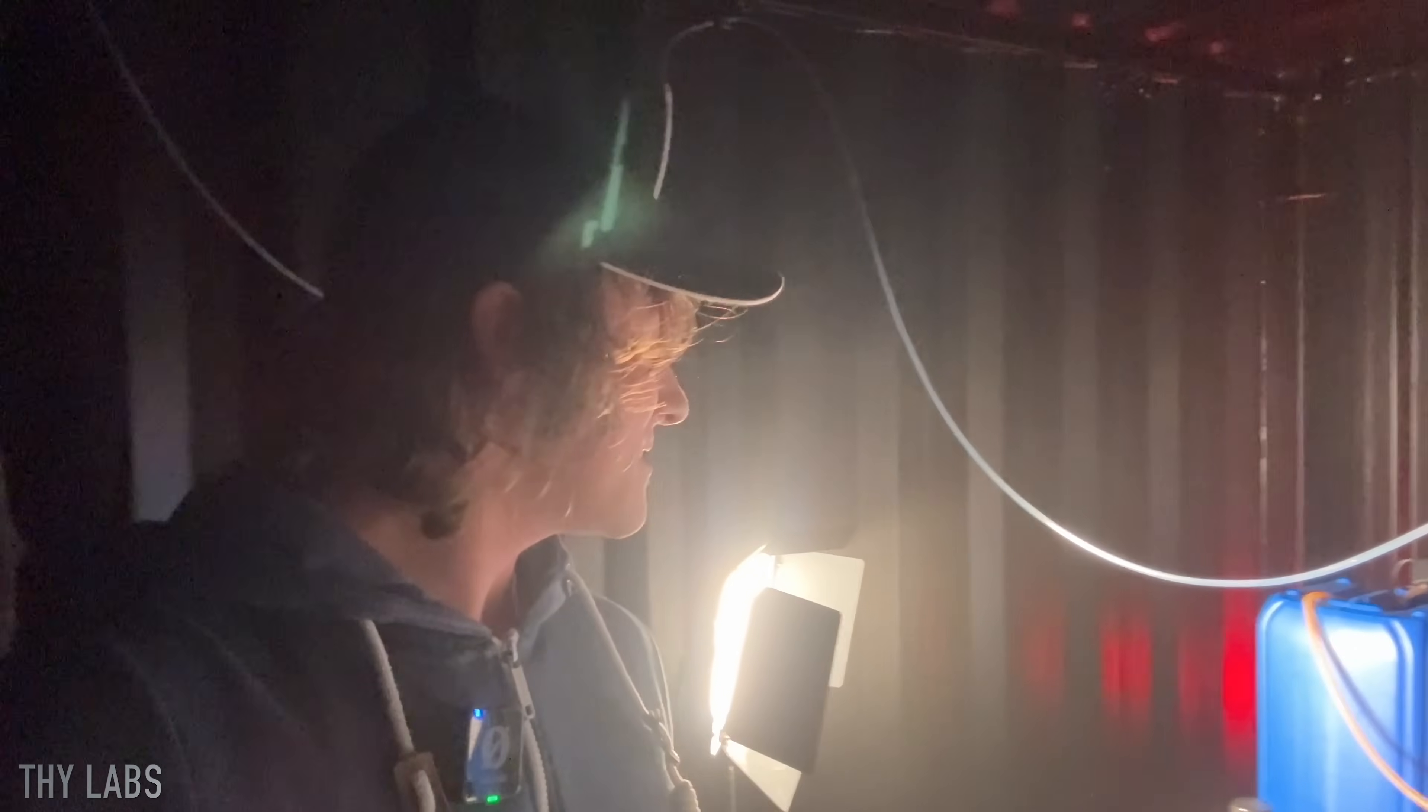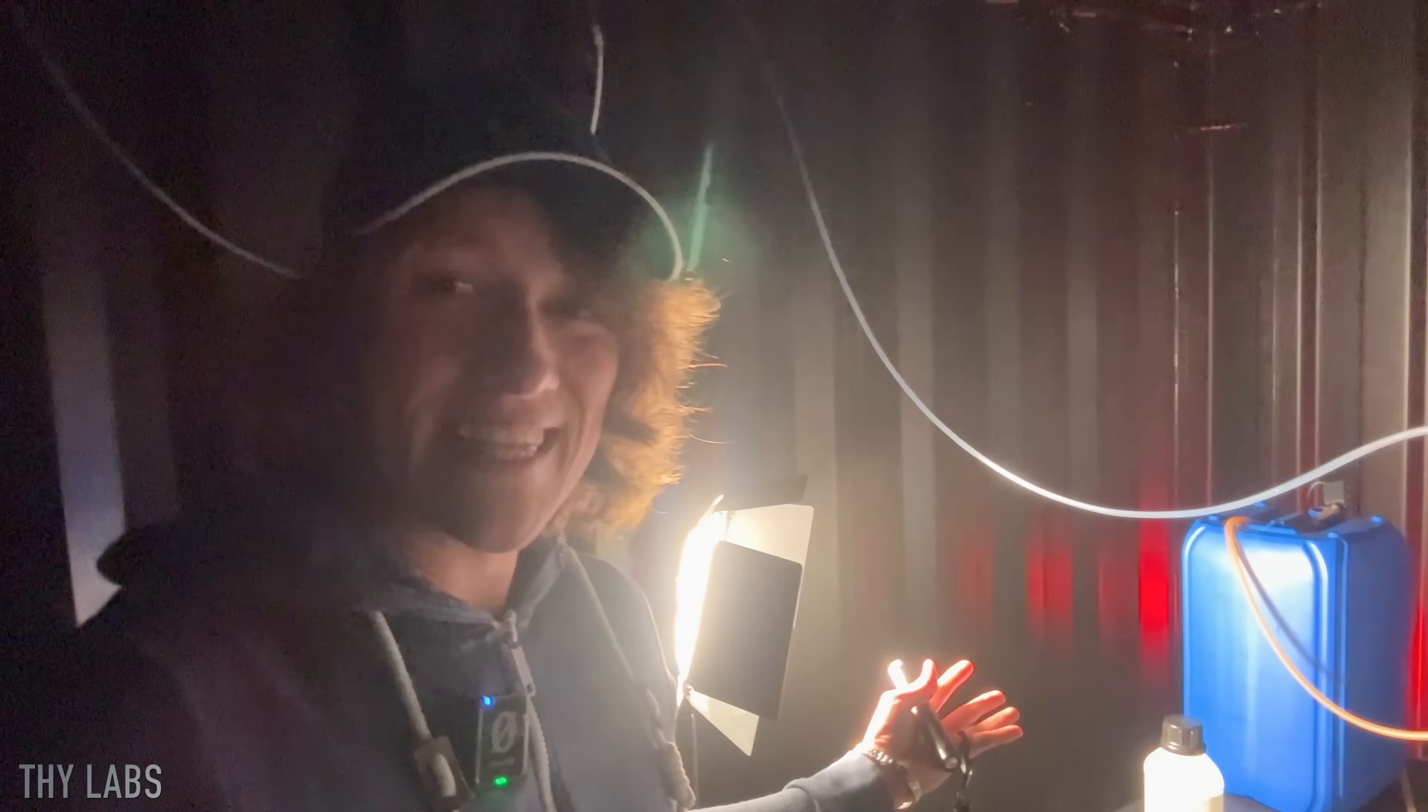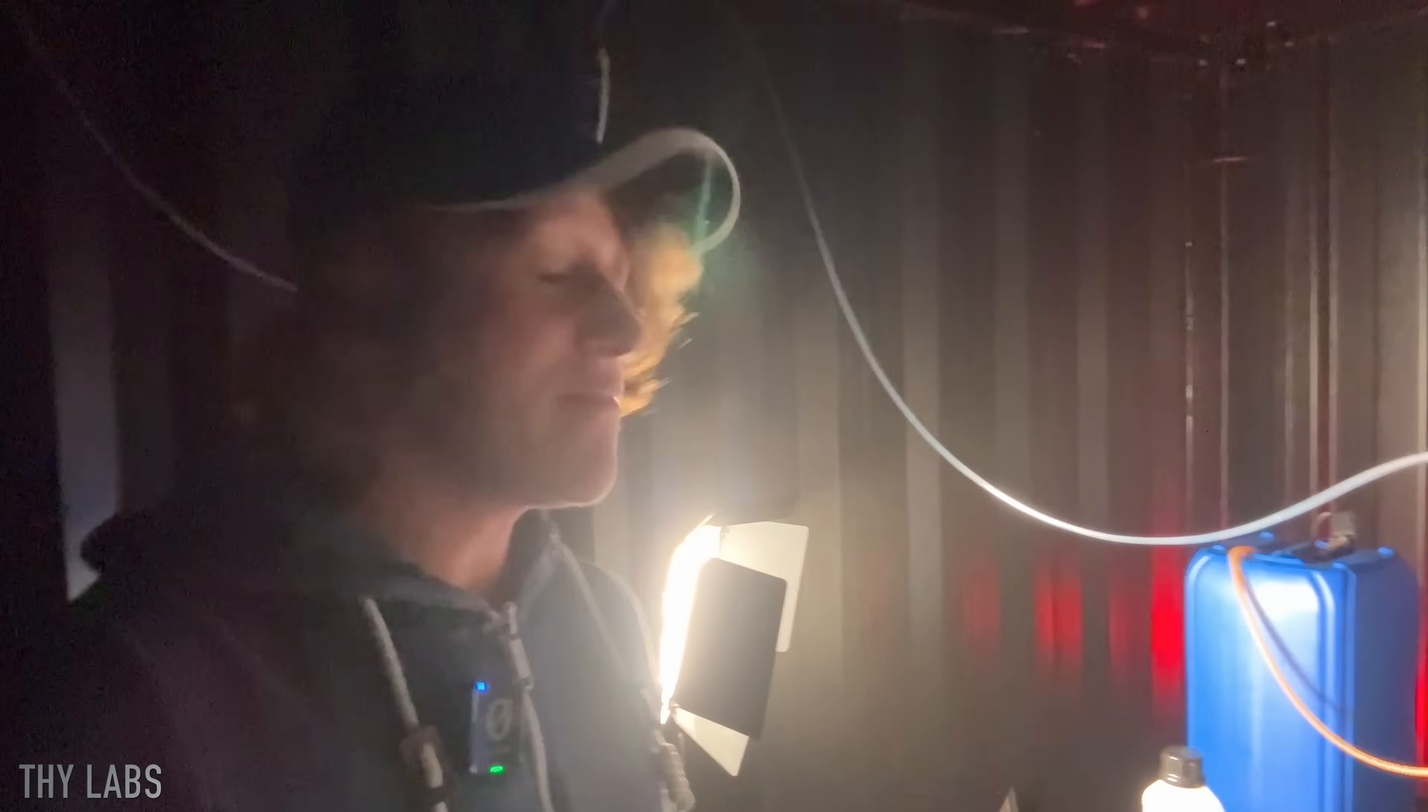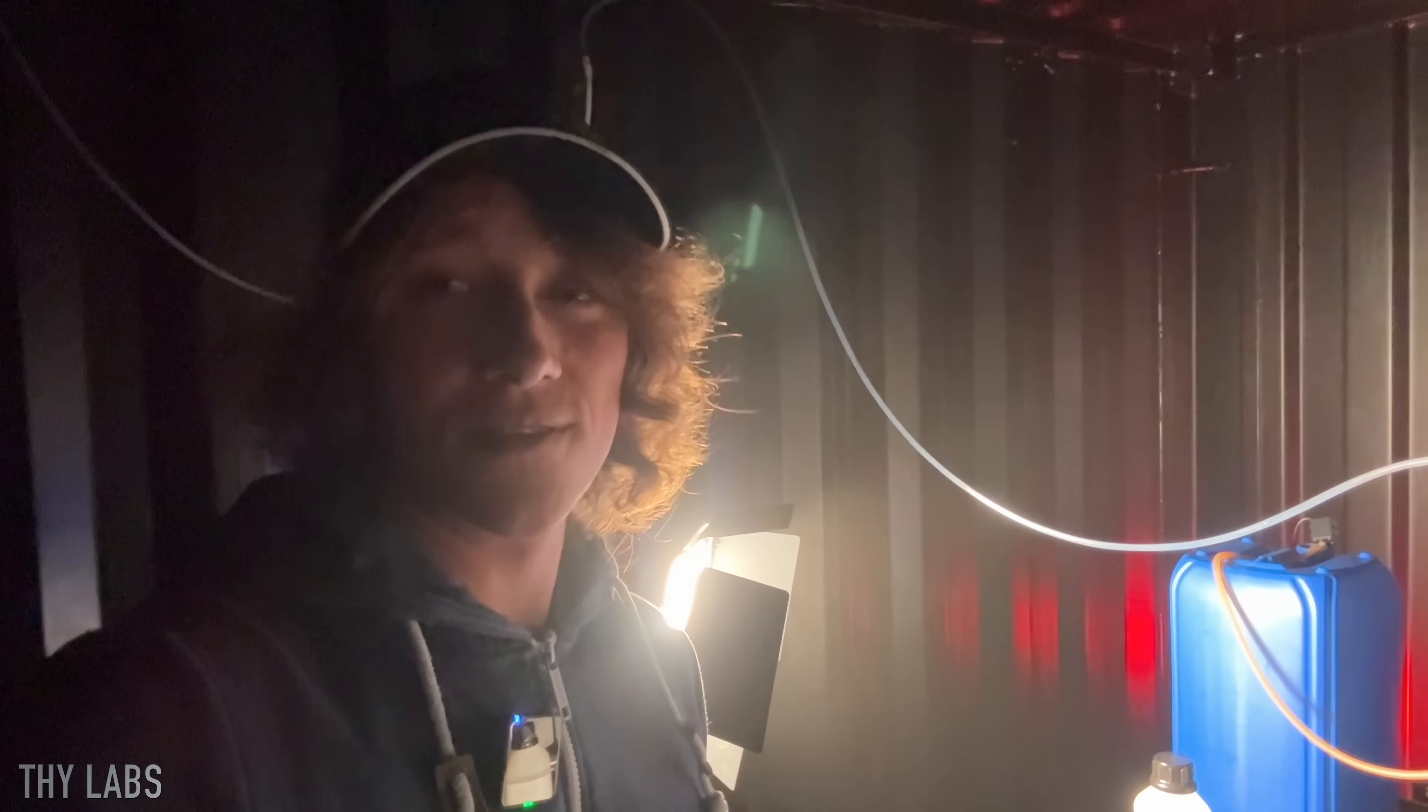I came back to the lab after 5 hours and noticed that there is a bunch of fog in here. Look at that. Triethylene glycol isn't toxic, it is also used in fog machines, but I didn't expect this.